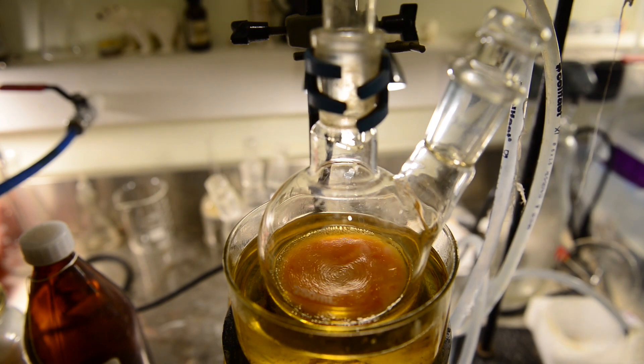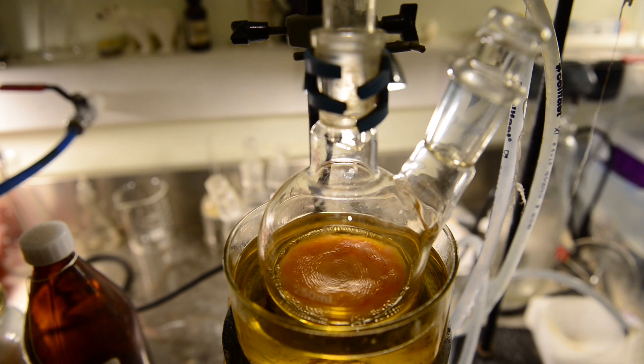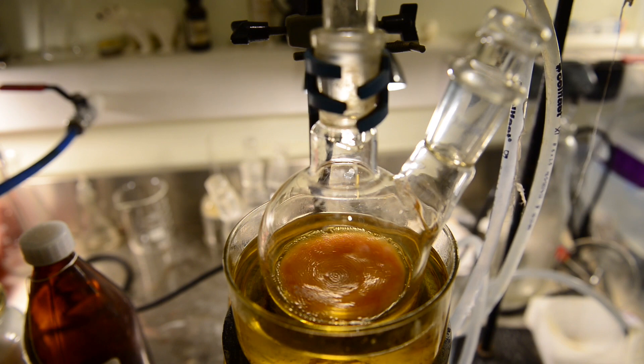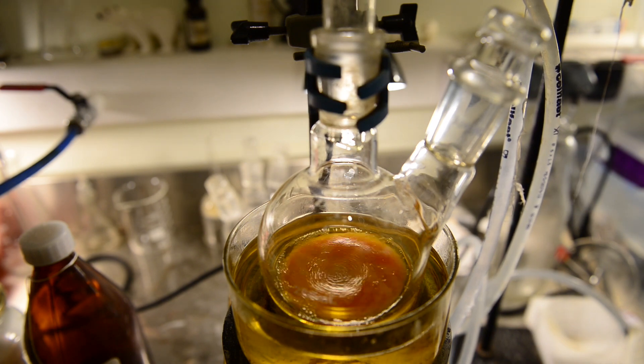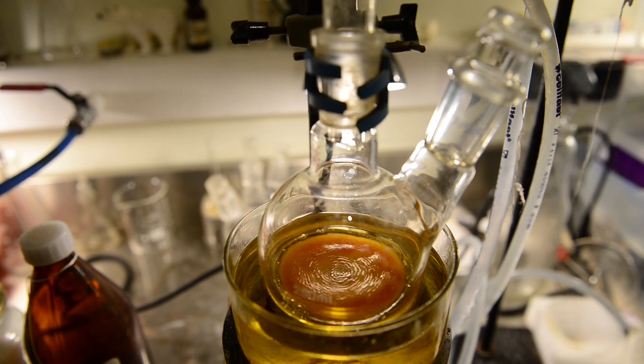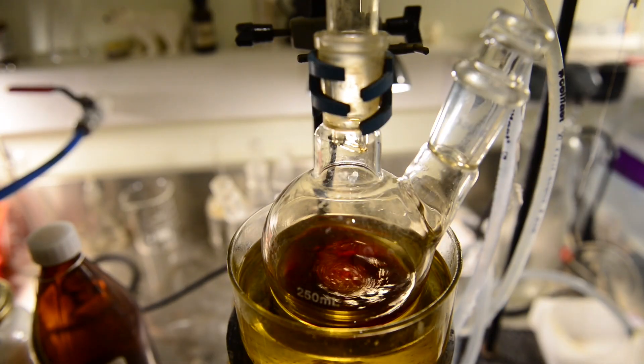After having all the ingredients added to the 250 milliliters reaction flask we start the heating and the stirring. The reflux condenser with ice-cold water circulation is attached to the top. We use a two-neck flask but one neck would be perfectly enough.